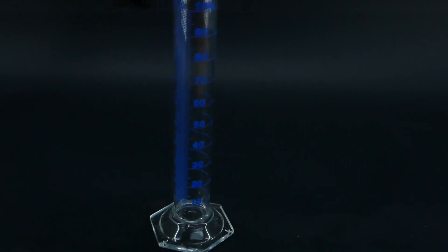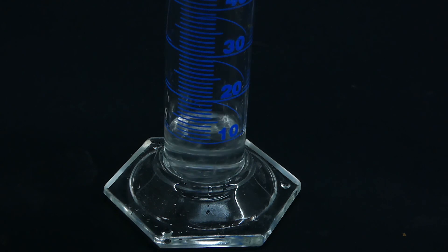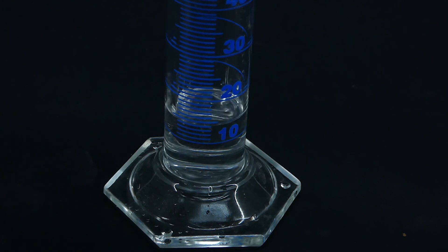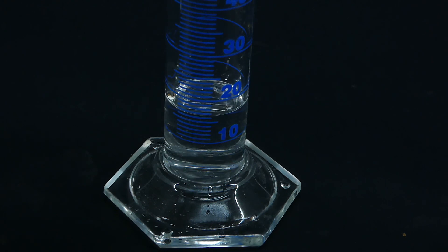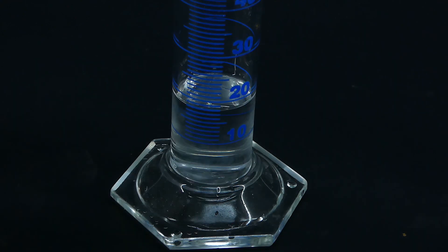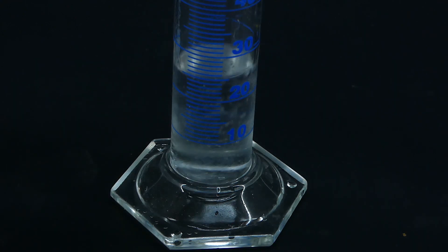To do that, I got a graduated cylinder and filled it with 17ml of isopropanol, followed by 19ml of hydrochloric acid.